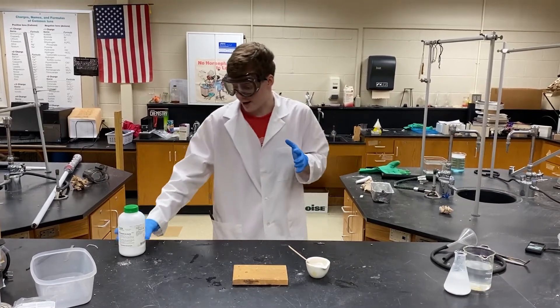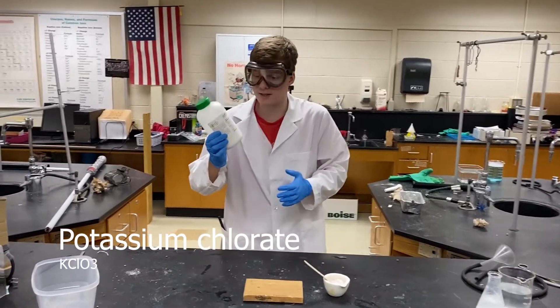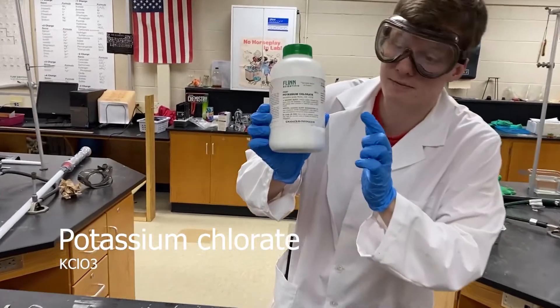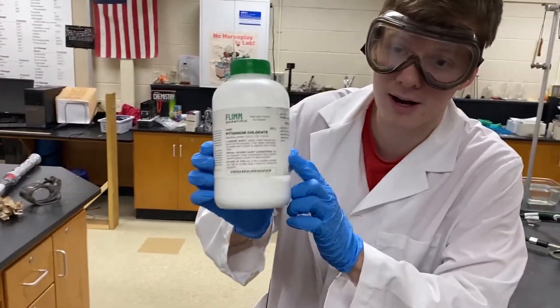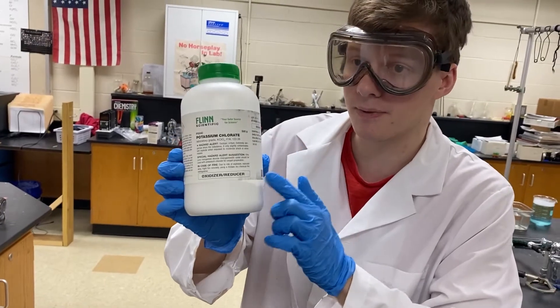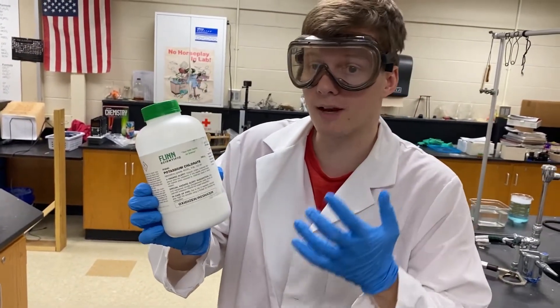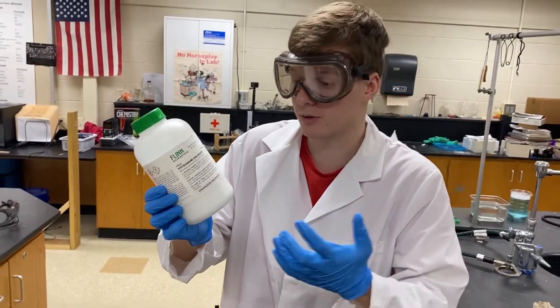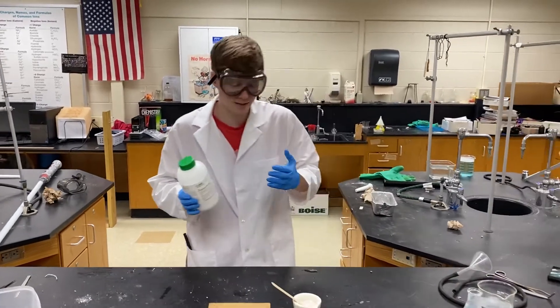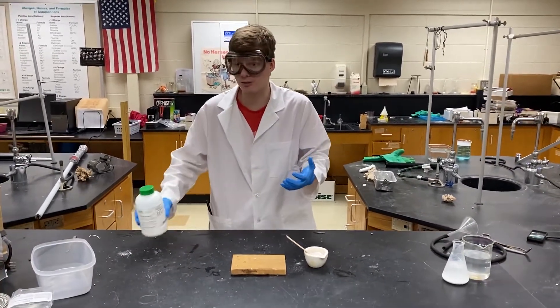Here I have potassium chlorate, KClO3 — that's its chemical formula. Potassium chlorate is a very strong oxidizer, meaning if we can mix it with certain chemicals that have a lot of energy or potential energy, we can actually get a nice combustion reaction.